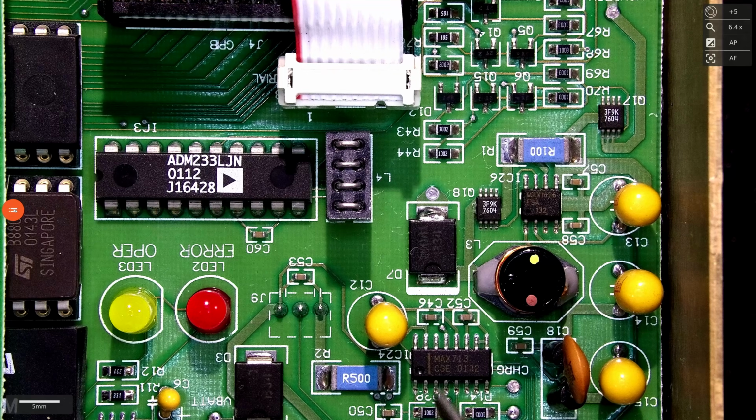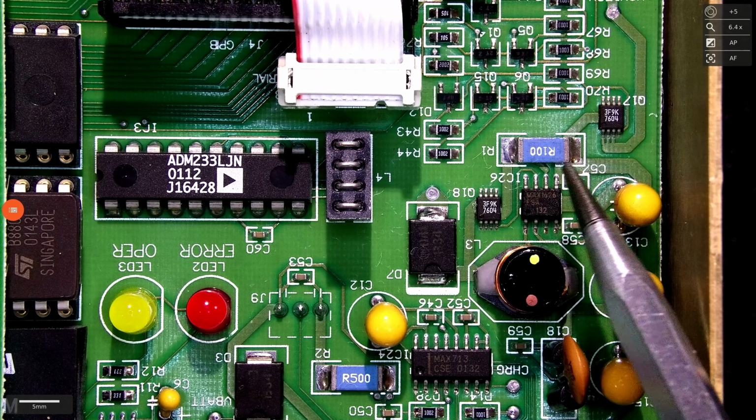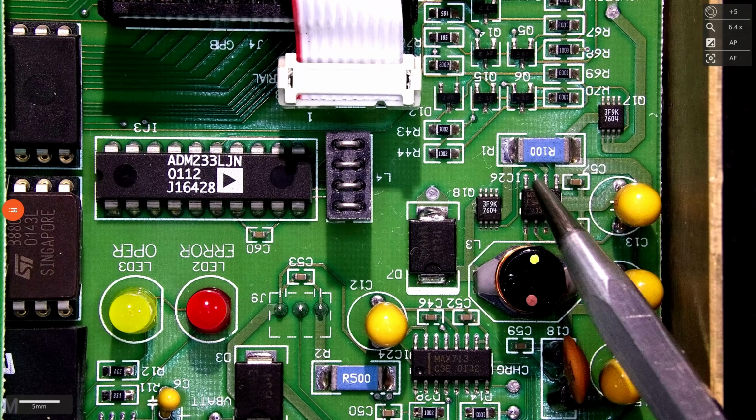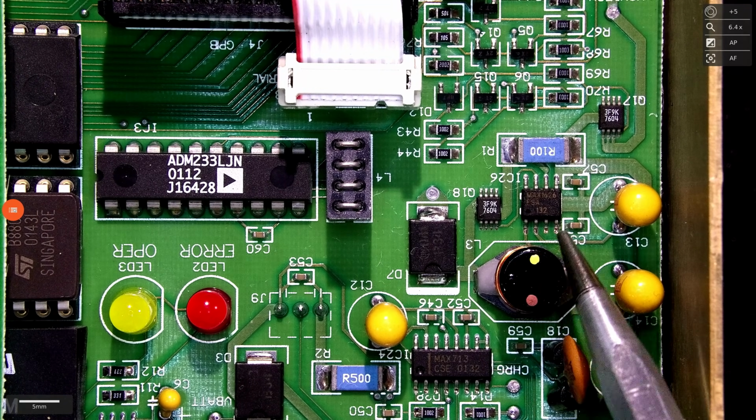And this looks like the output right over here. This must be the CMOS for the switching. There is a series resistor in it, so if there's a problem, this actually will drop the voltage, which is consistent with not seeing any other life potentially if there is a problem with this one.